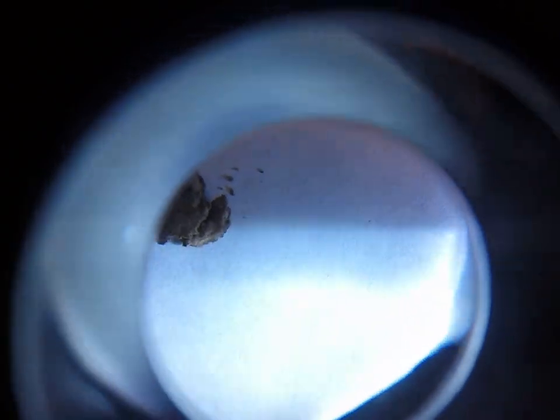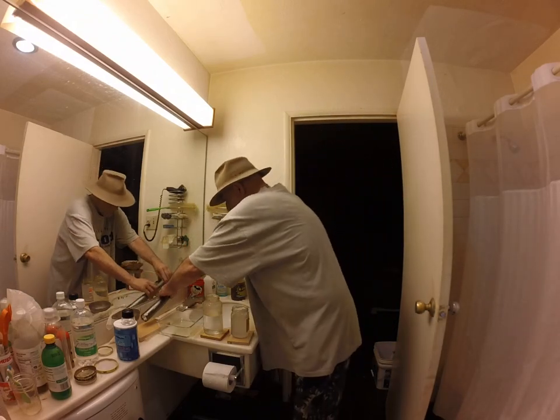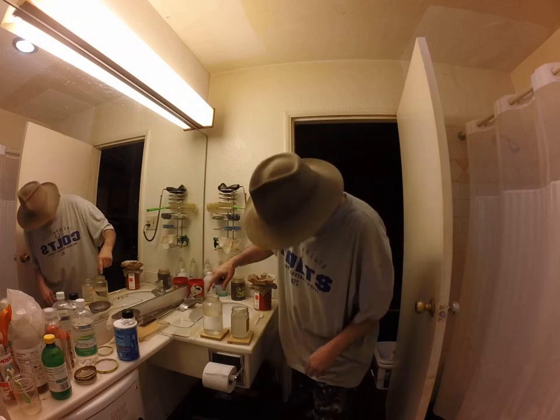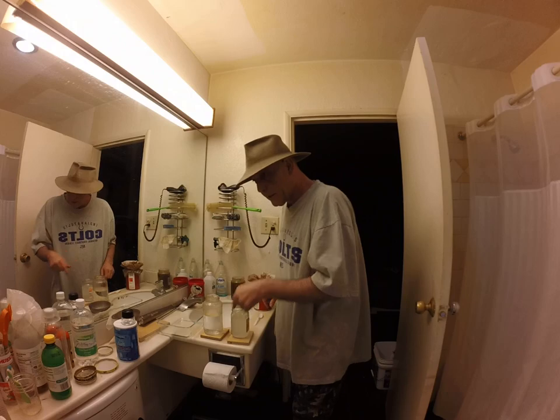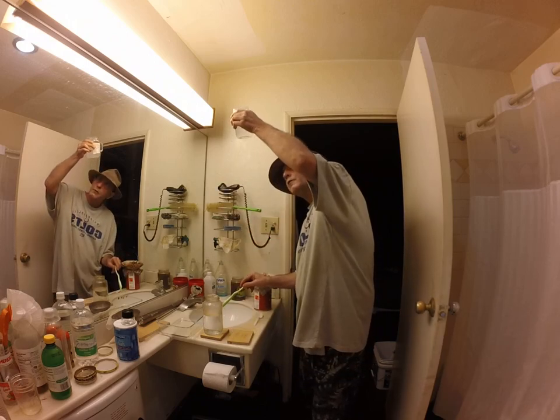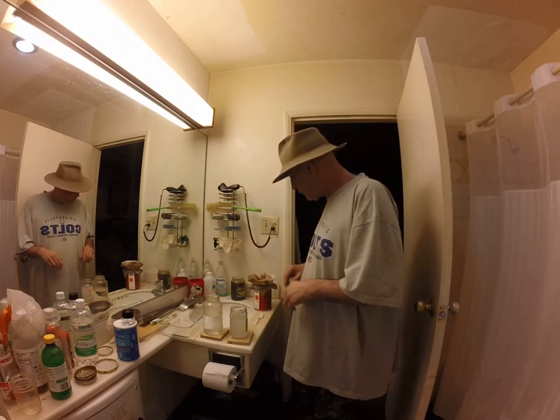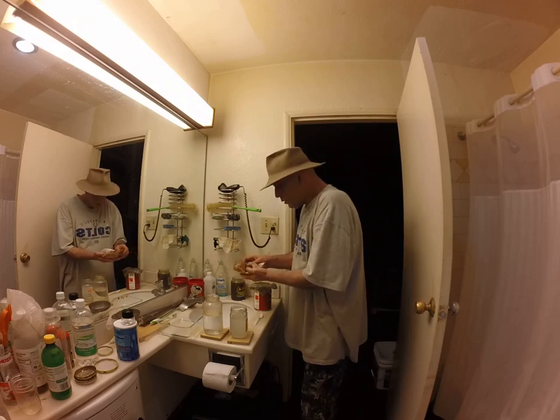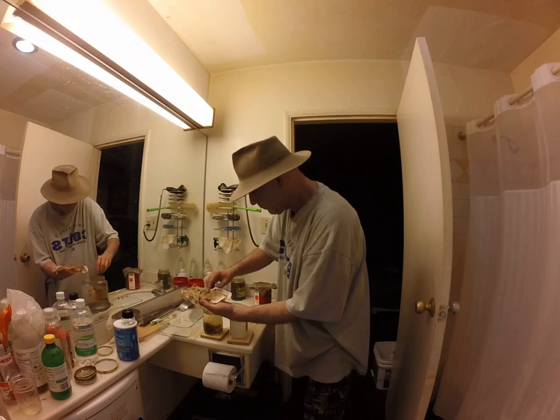Anyway, what I've got here is about one part 5% vinegar and three parts hot water, and this right here is just plain hot water with as much salt dissolved into it as it'll take — there's still just a little bit of salt swirling around at the bottom. These were heating up together in the same hot bath in a pot on an electric stove. So what I'm going to do is just go ahead and drop that harmala freebase in there.